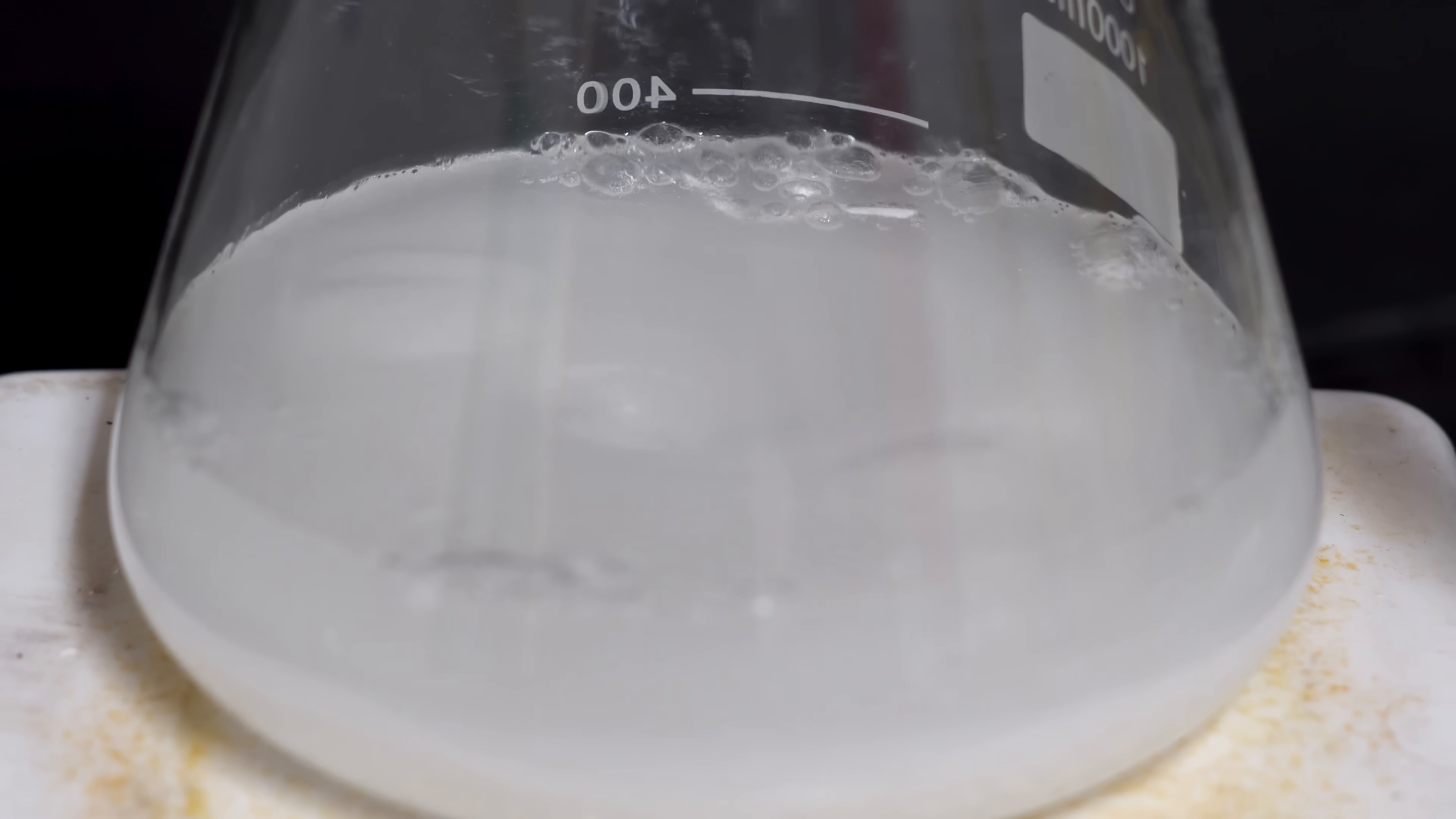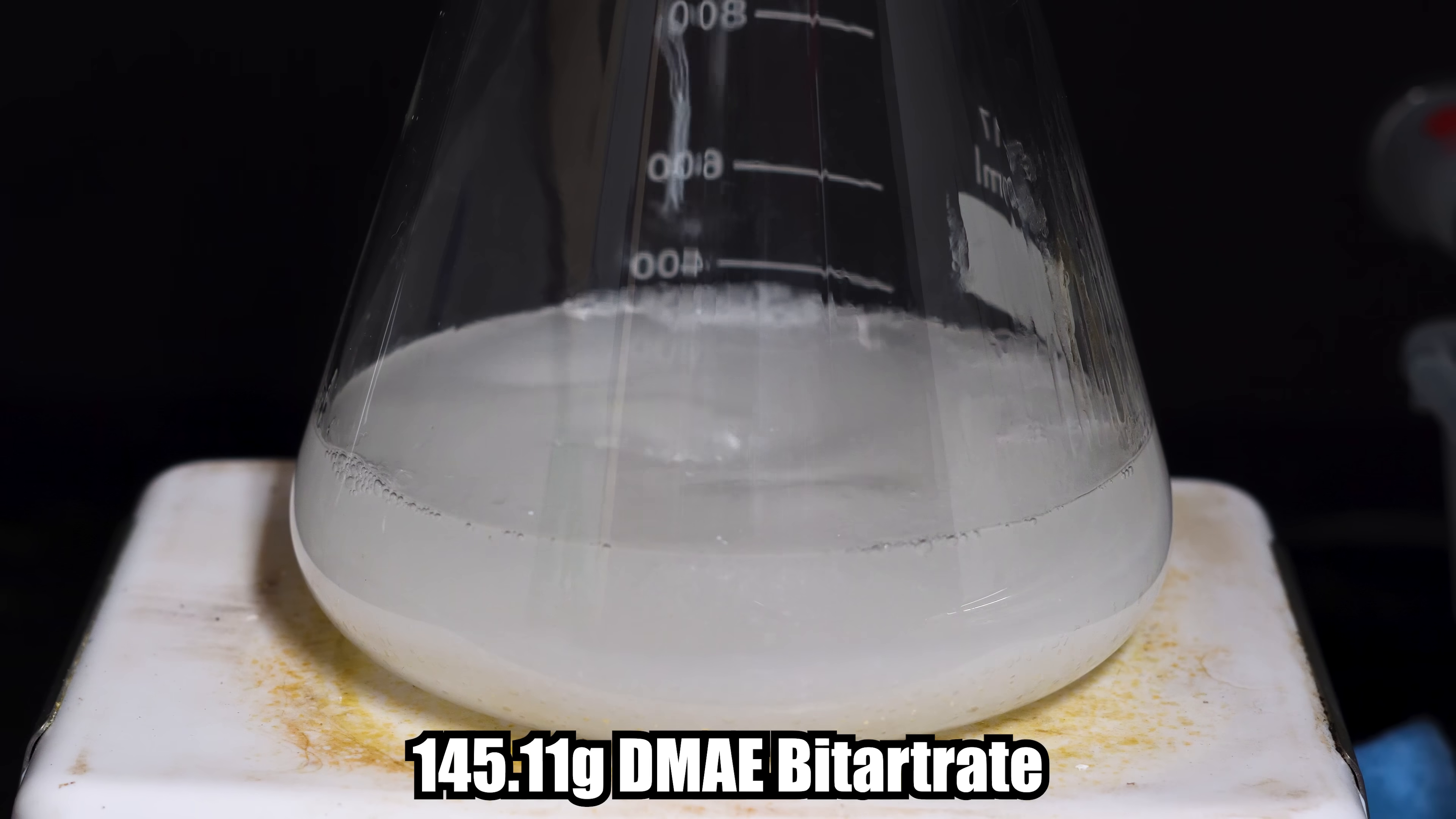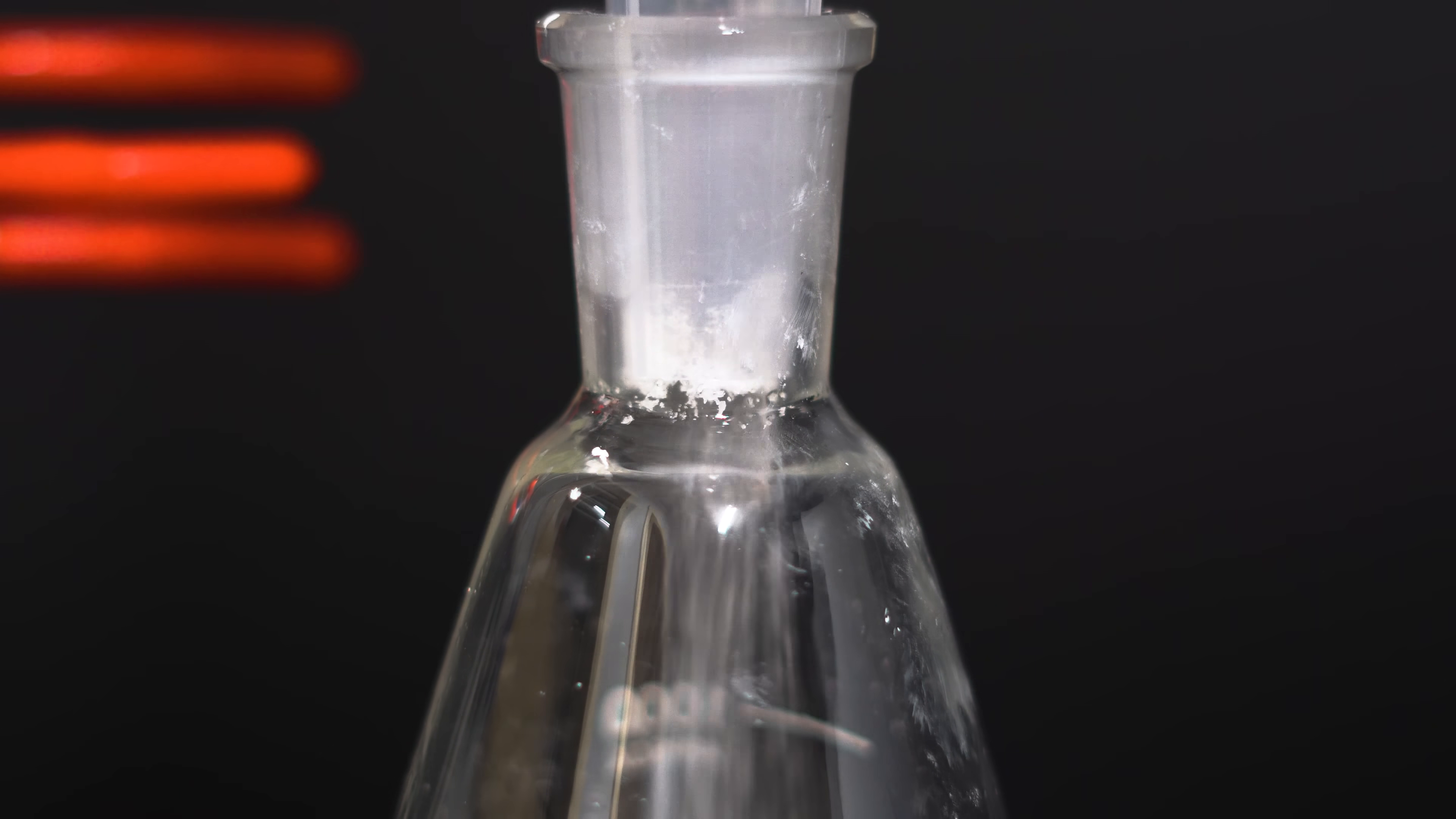Once we had all the sodium almost reacted, I just had a couple slivers left. I was a little impatient and I decided to add the DMA-E bitartrate. I took the condenser off and I got ready to add the supplement in there. 145.11 grams of DMA-E bitartrate was added into the flask. It kind of felt like I was loading a black powder rifle when I used the stir rod to push the powder in the funnel.